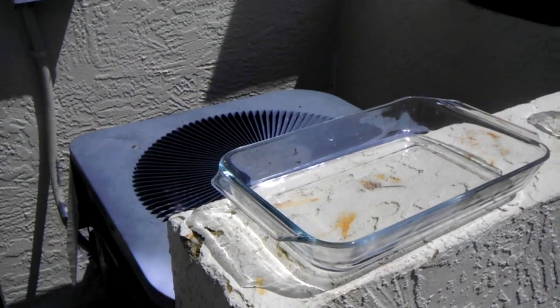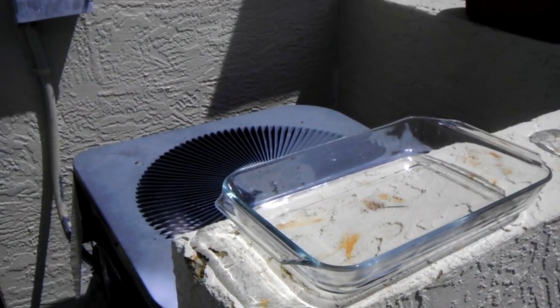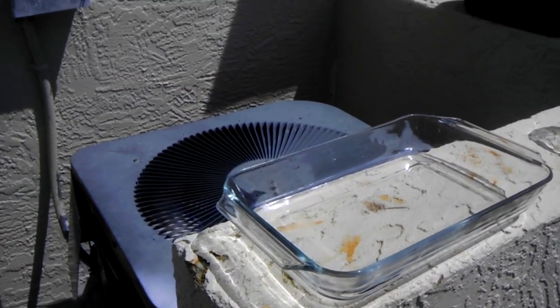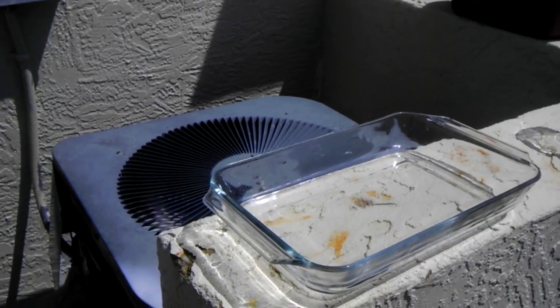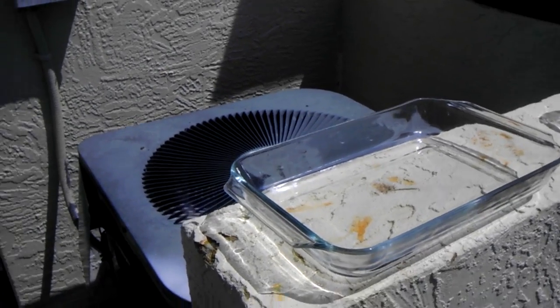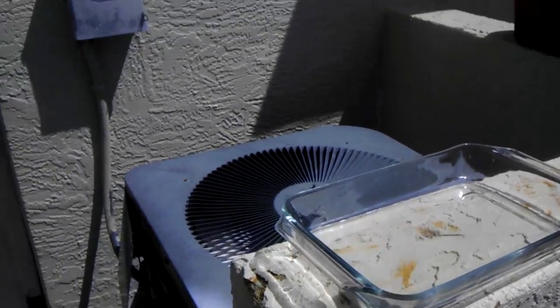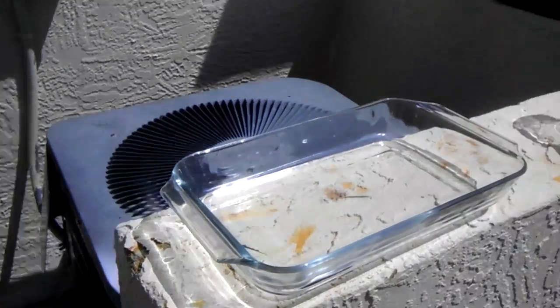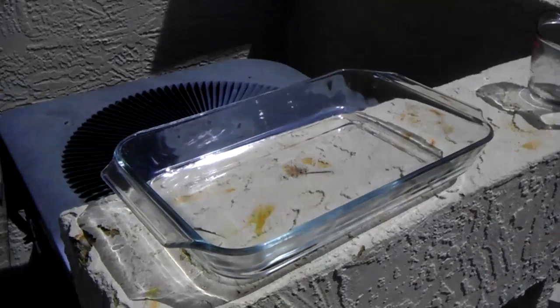I placed my baking dish outside in the hot Florida sun next to my air conditioner. It provides a lot of heat and a lot of breeze, so this should evaporate fairly quickly.